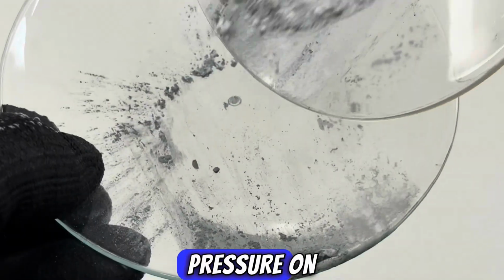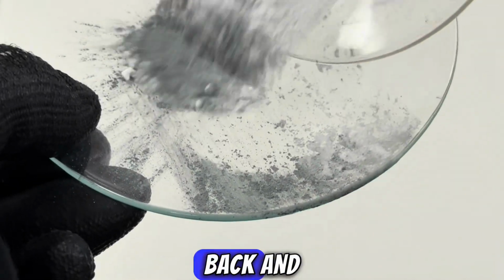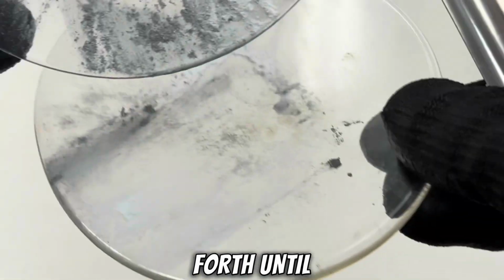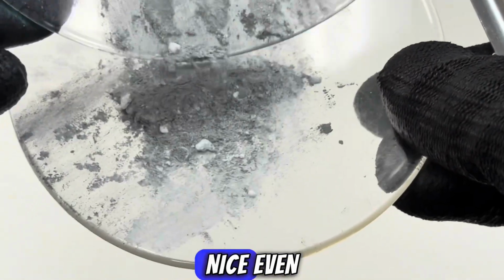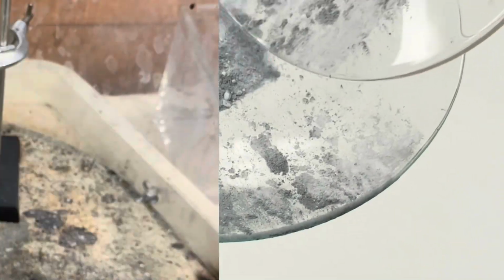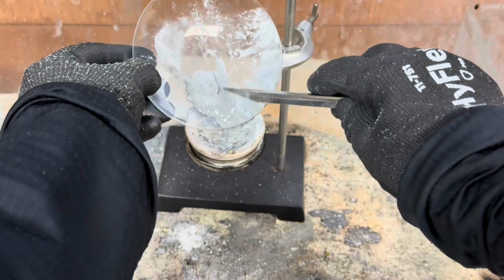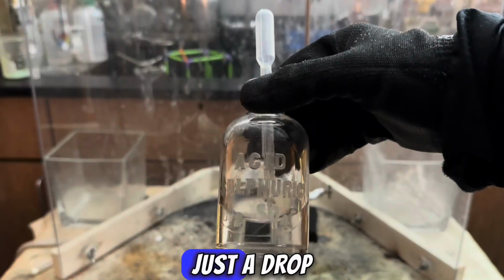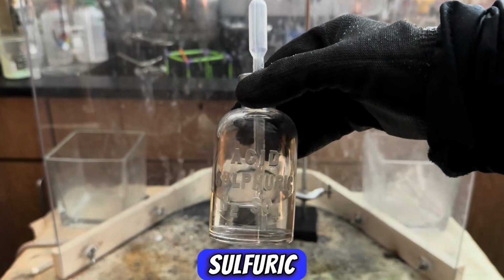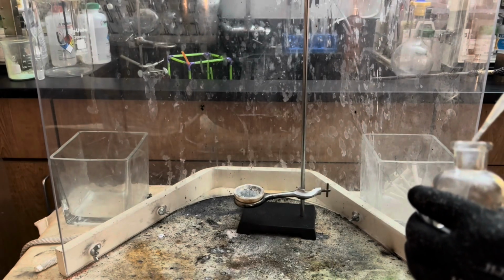But you don't want to put pressure on it. Certainly don't use a mortar and pestle, but just pour them back and forth until you have a nice even mixture. And finally, add your mixture to a ceramic crucible. Now we're going to add just a drop of 18 molar sulfuric acid. Check out what happens.